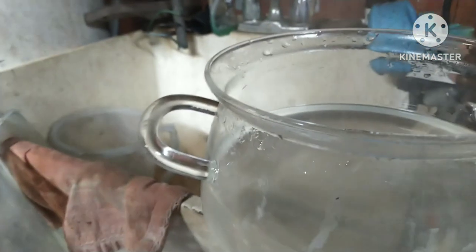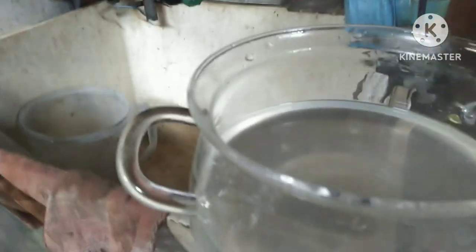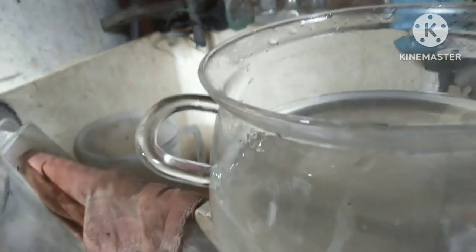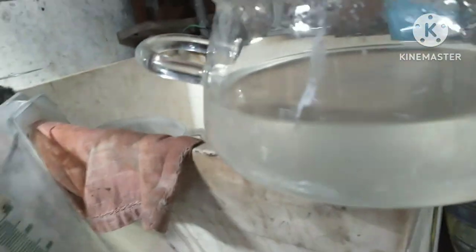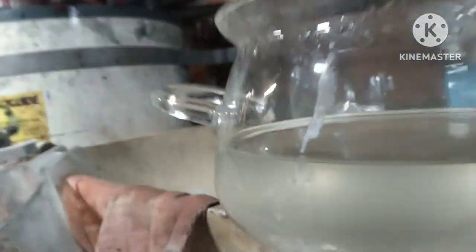I've got a little more than half of it evaporated away. Now I'm going to let this cool and scrape out the crystals that form — there will still be a decent amount of liquid in there. As you can see, there's still a little bit of yellowing in there which I just can't get out, but it's not going to be a big deal. As you'll see at the end, it also has super white crystals. I'm going to let this solidify out.